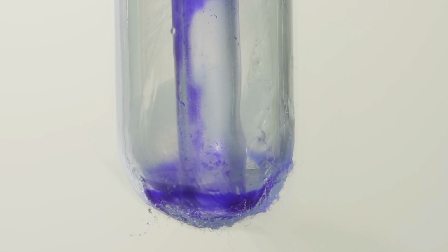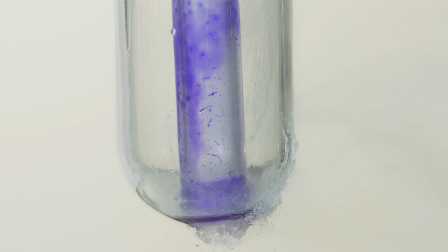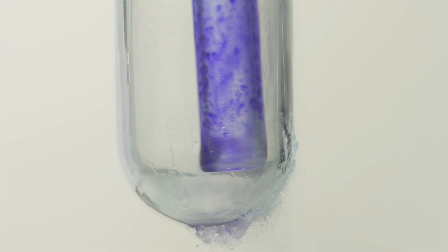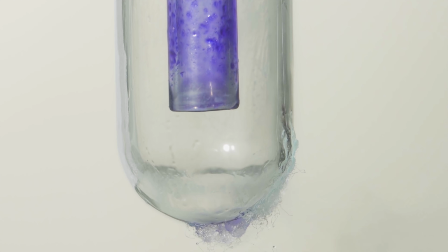If we cool down extra dry ozonated oxygen neatly, so that no air gets into it and oxygen doesn't condense, we'll be able to get a few drops of practically pure ozone that has a purple color. Take a look at these guys. This is liquid ozone drops.